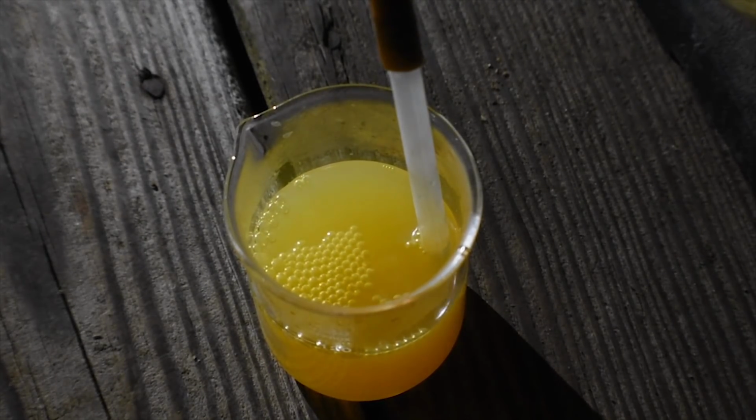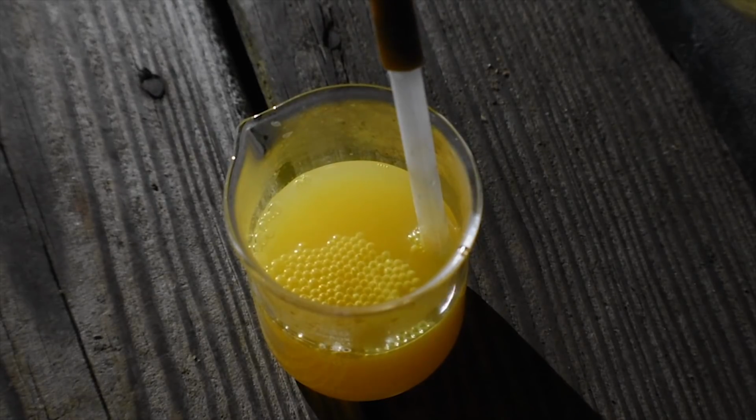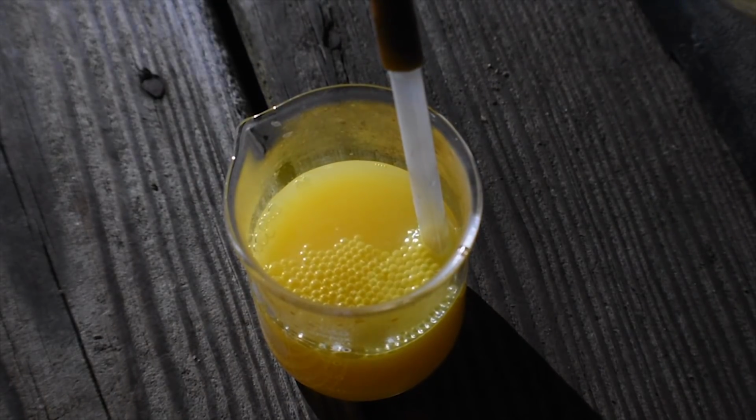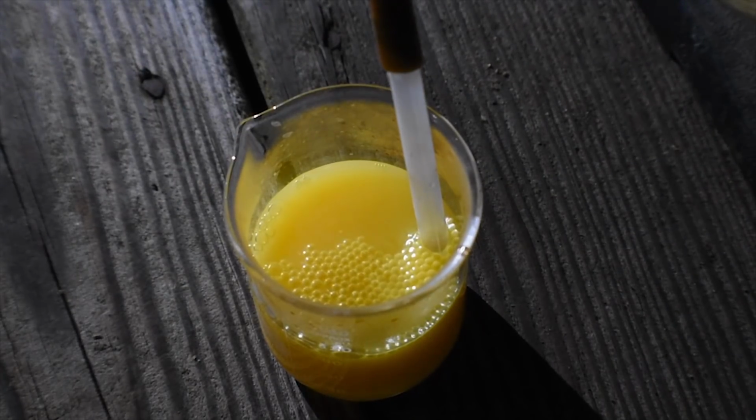As we can see, there is some perthiocyanogen crystallizing out, or precipitating out of solution. This is the yellow color that you can see right now, and it's a good sign that our reaction is working. I found this reaction to be much more reliable than the nitric acid method of creating perthiocyanogen, because, well, it works, and the nitric acid method really doesn't, in my experience. So, yeah, let's just keep going. There's still more perthiocyanogen to be had.